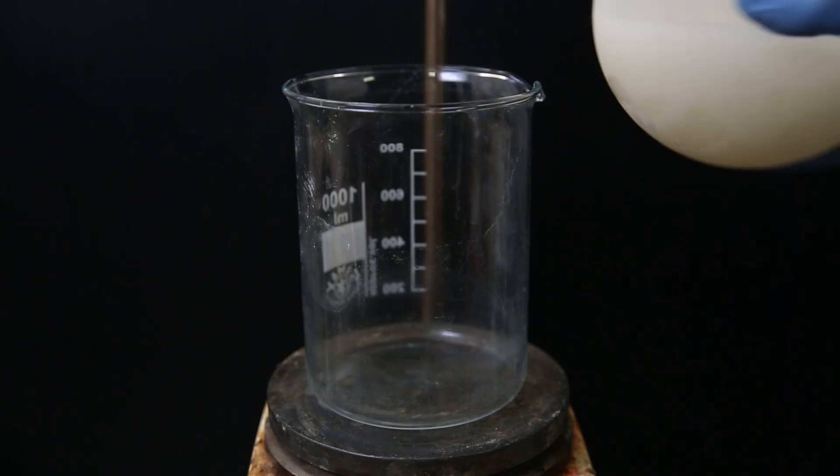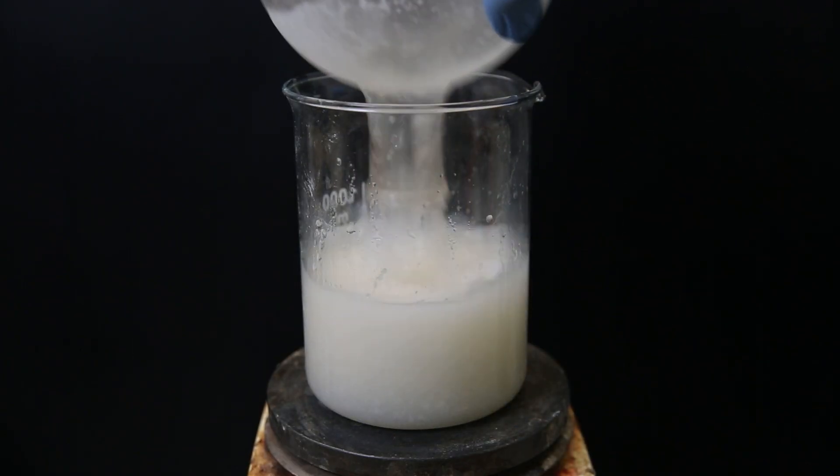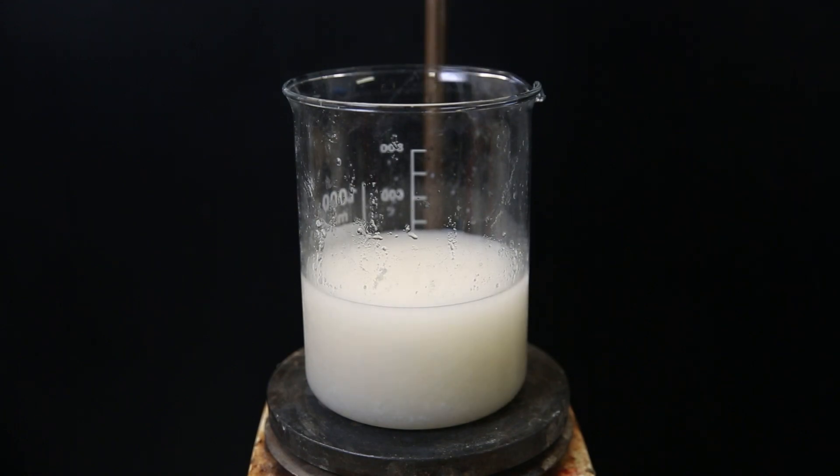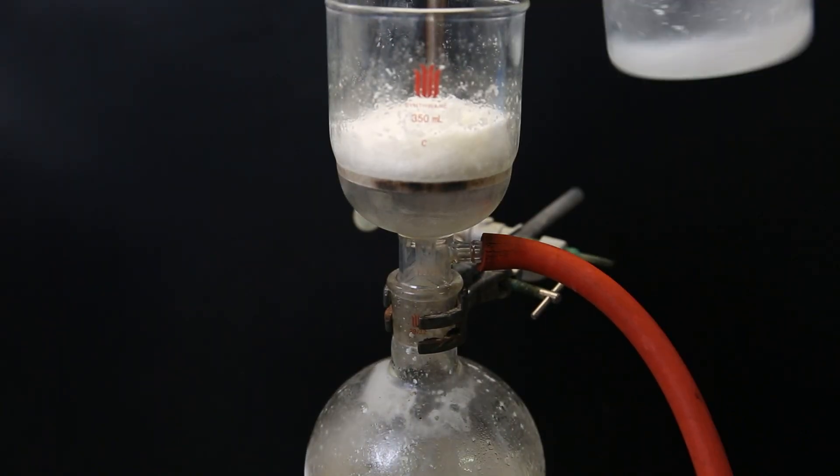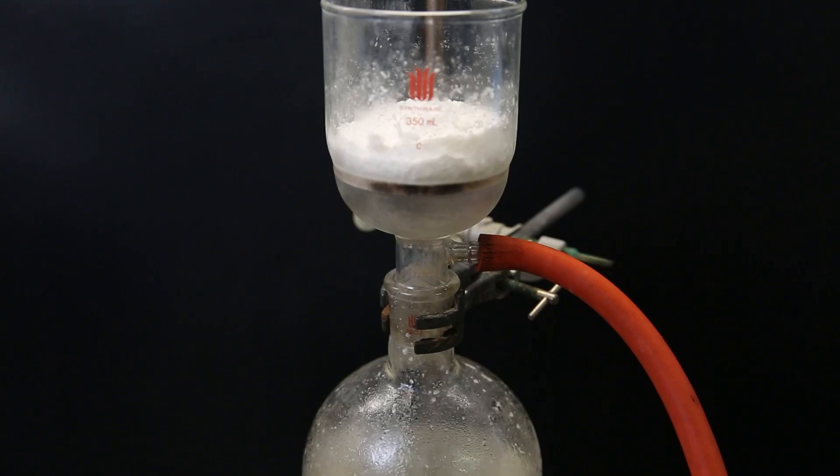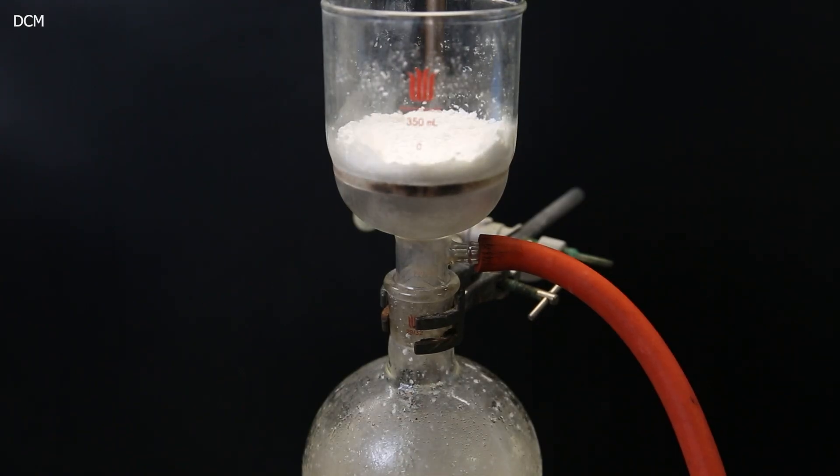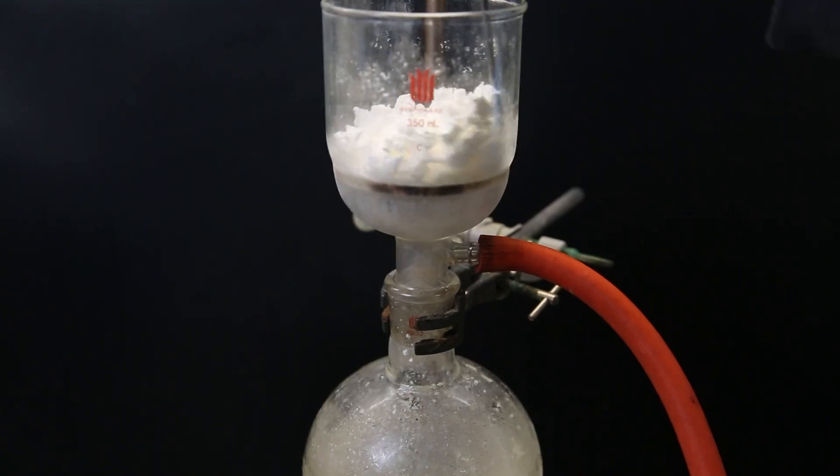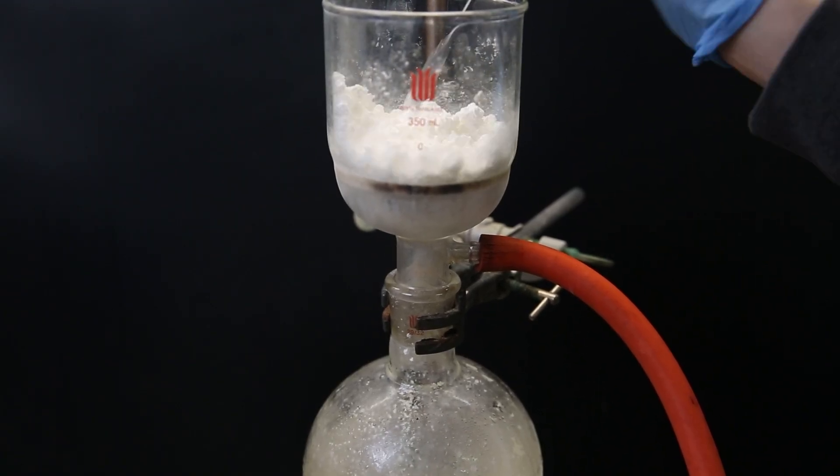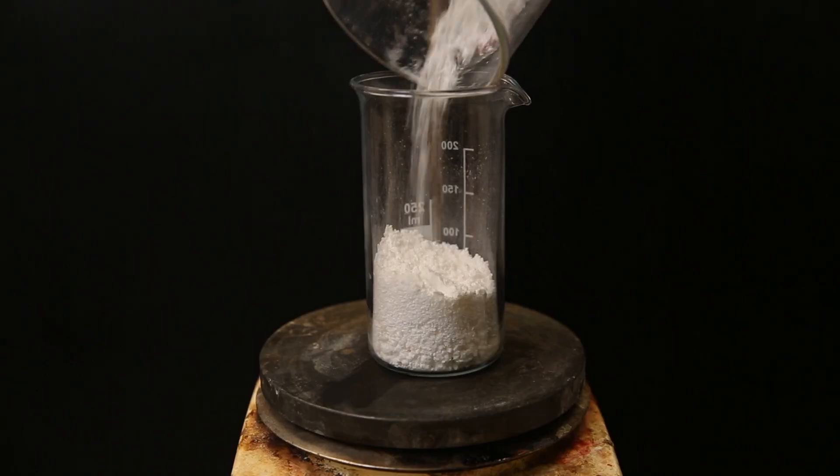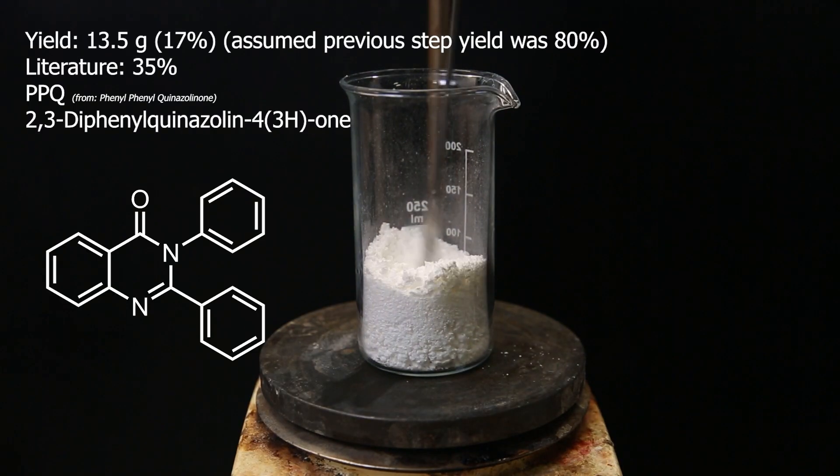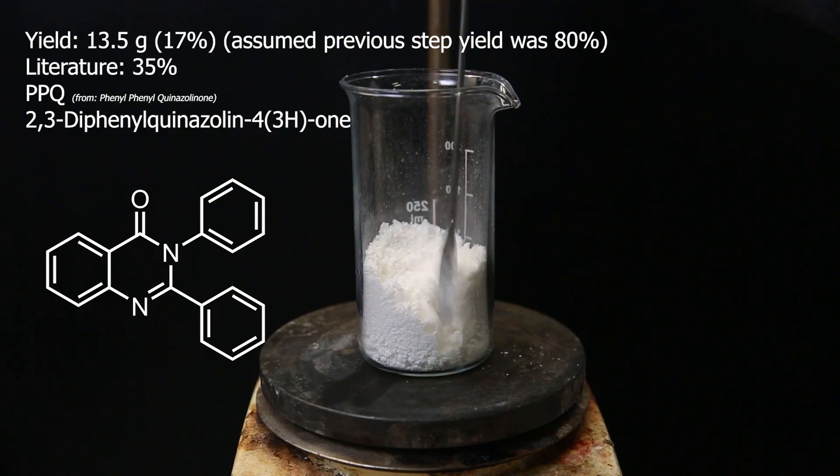It worked, and I transferred it to a beaker because I want to use this flask for the filtration. I then set it up for vacuum filtration to collect all the solid. To remove the toluene, which is a lot more annoying to evaporate, I wash it with DCM, which will carry it away. I let it dry on the filter for a while and then move it on to a beaker, giving a pure yield of 13.5 grams of PPQ, which is about 17%.